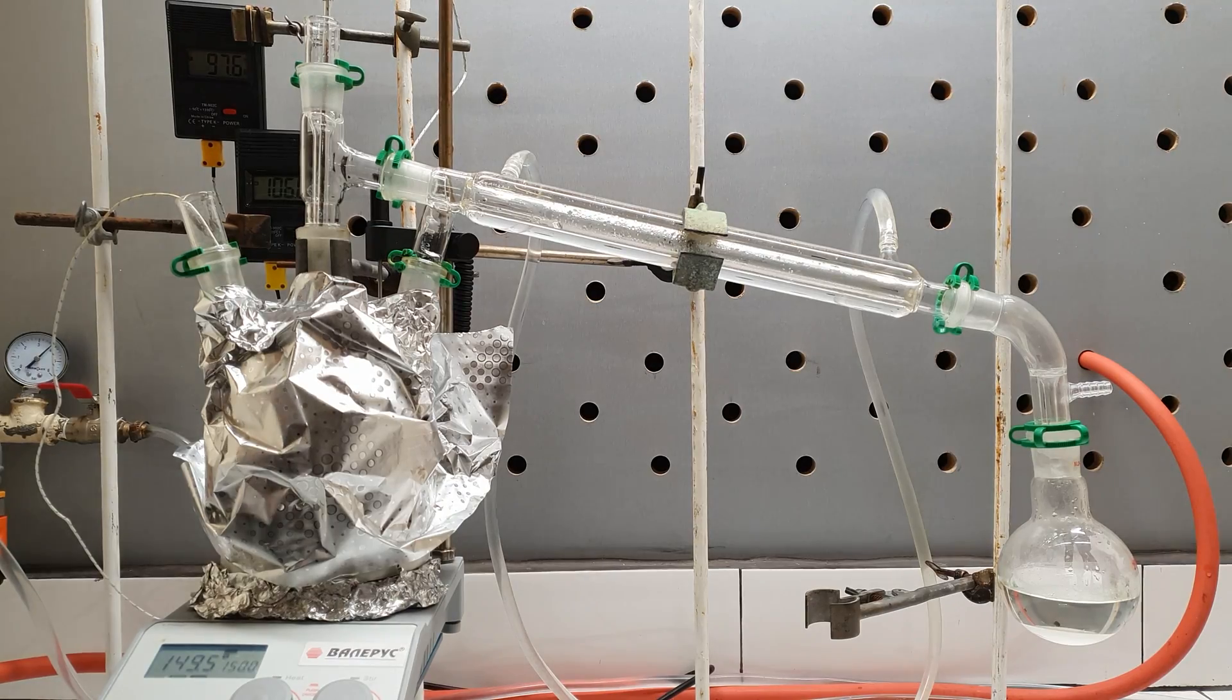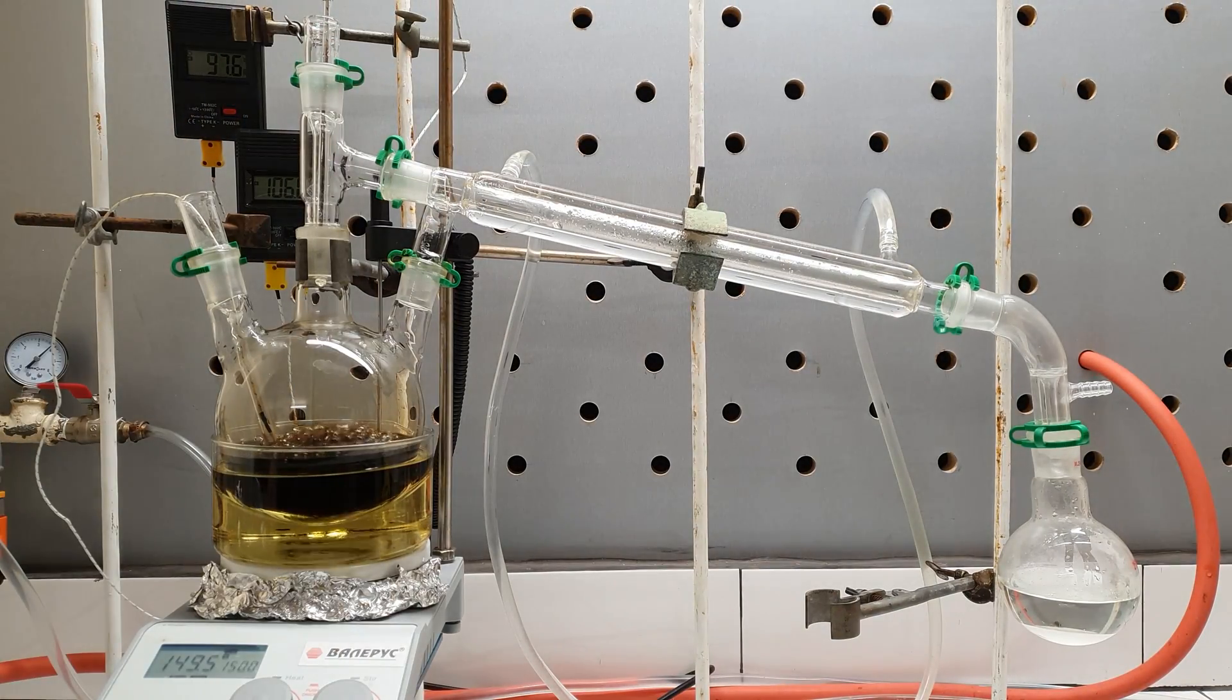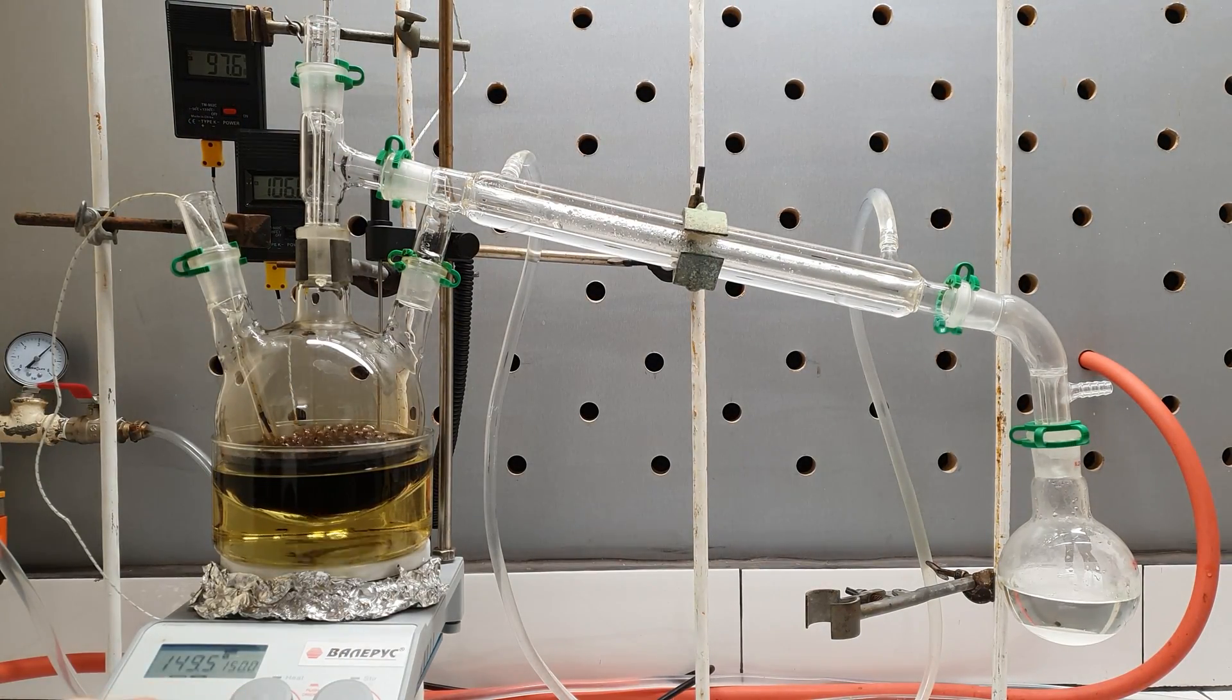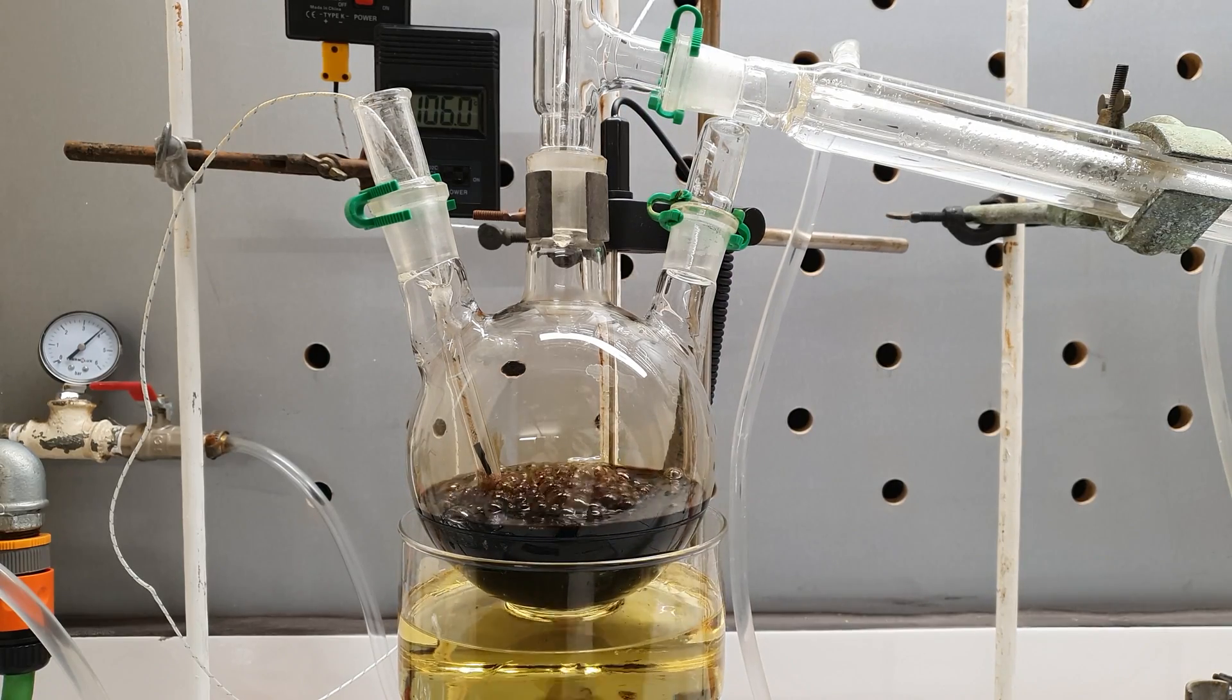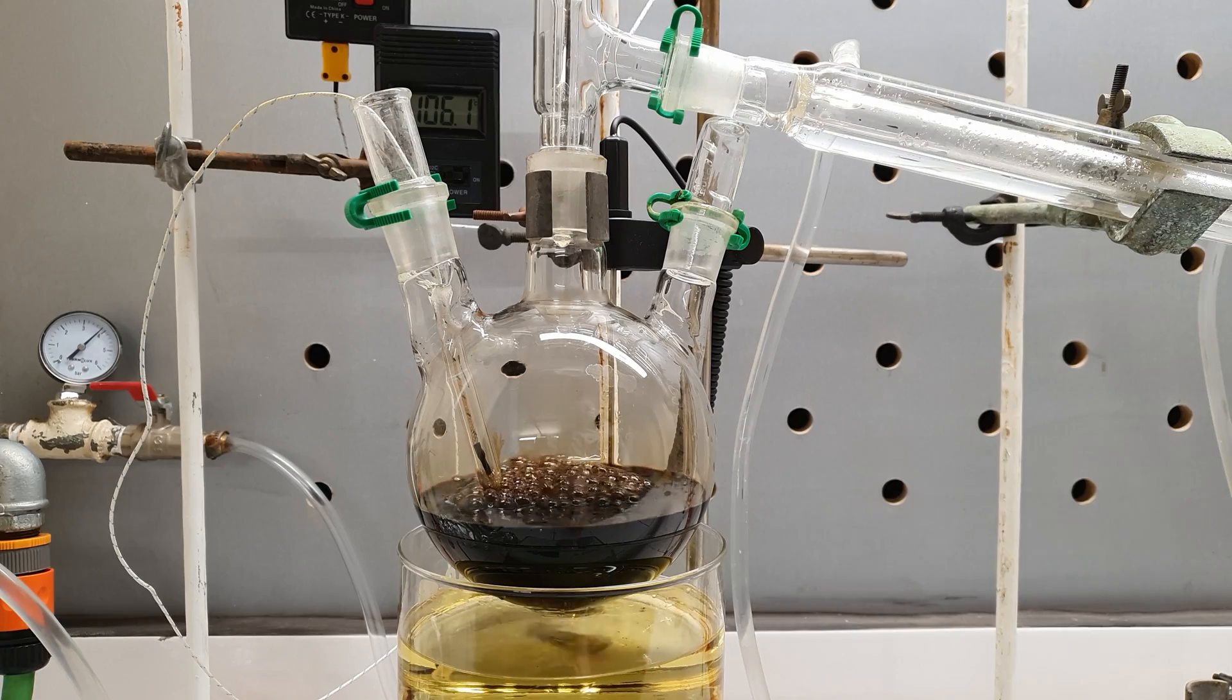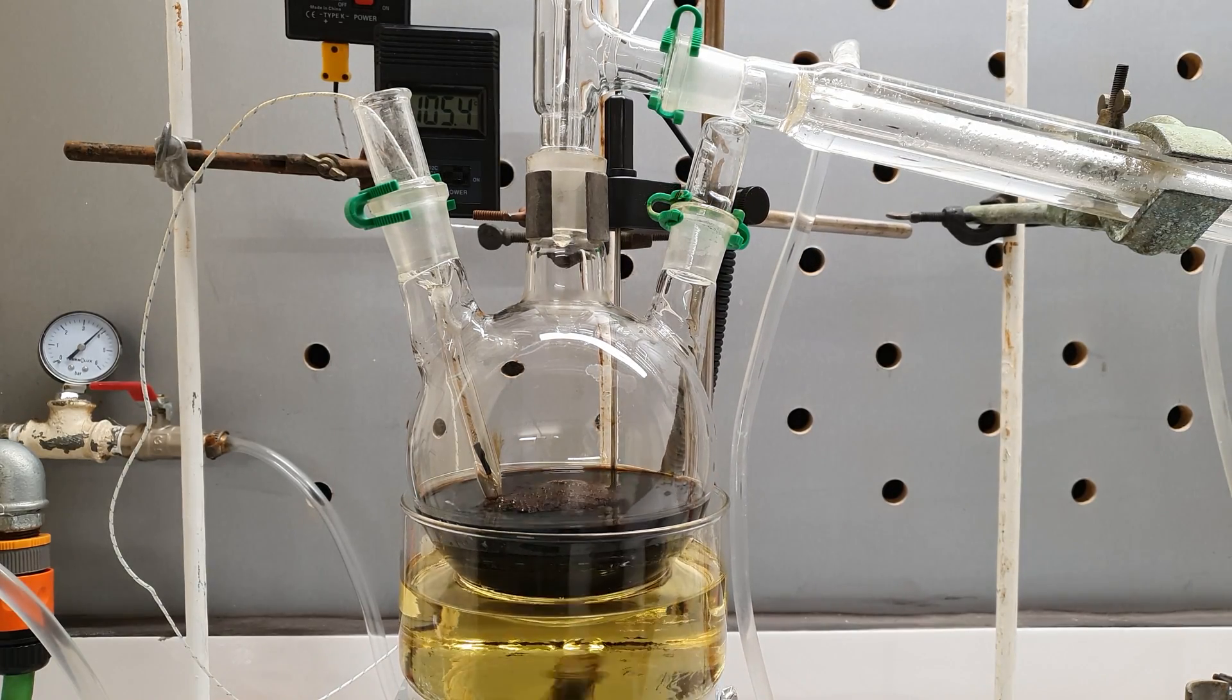Not an easy task when carrying out this reaction is to determine when it's done. One way is to remove the heating and watch if carbon dioxide continues to form. If that's the case, the heating should be continued.